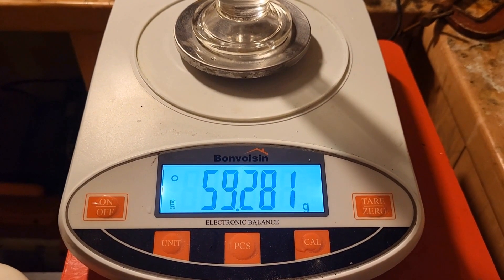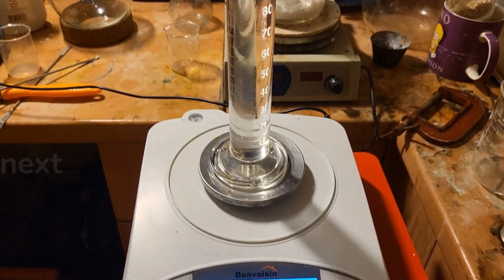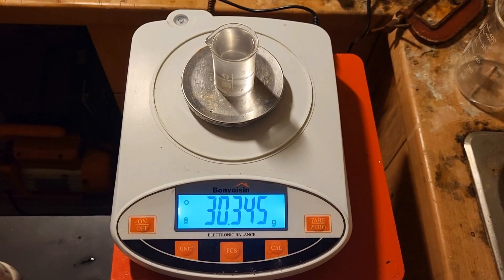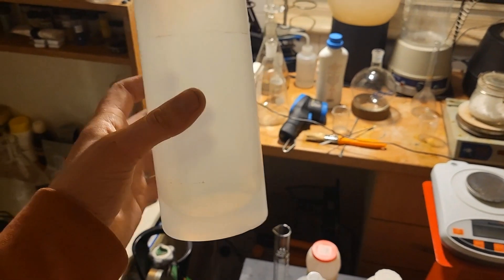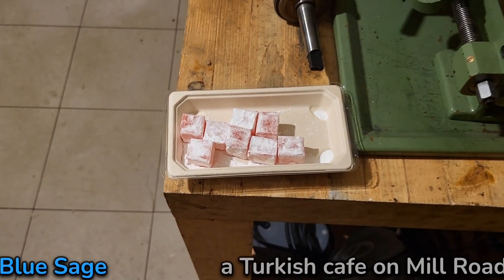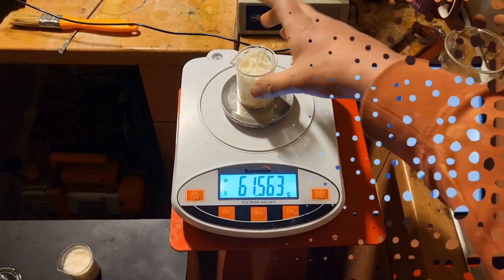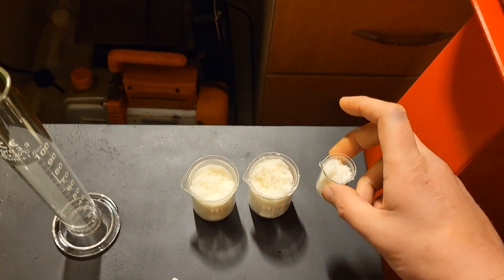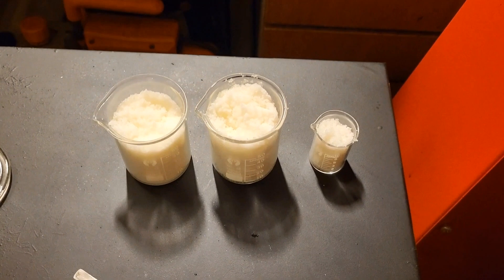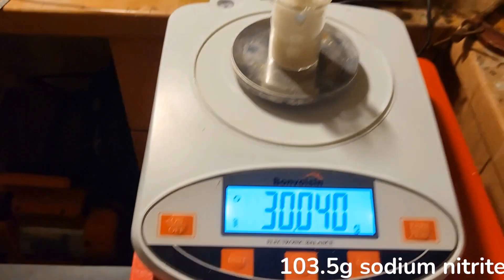180 grams of hydrochloric acid is put into a flask which will go into the freezer. 130 grams of isopropyl alcohol will be put into the fridge. That's 133 grams of sodium nitrite — that should have been 103 grams, so I've removed 30 grams.